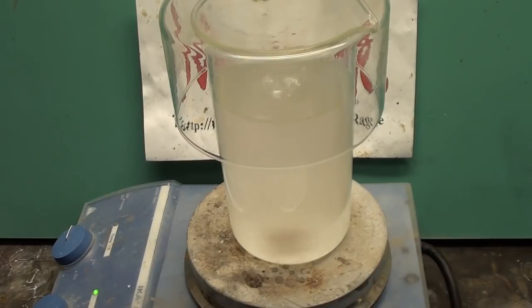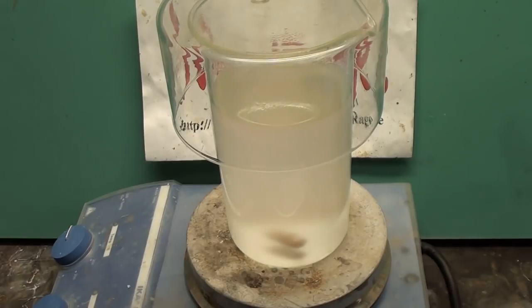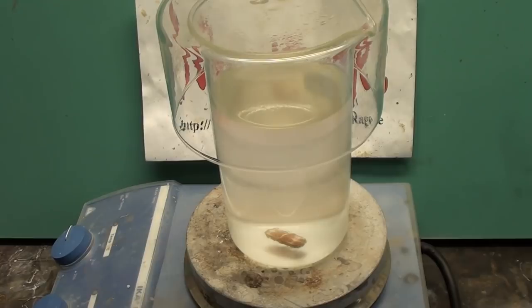The cloudiness is actually really small droplets of methyl ethyl ketazine along with some methyl ethyl ketone. Stop stirring and let the mixture separate into two layers. This is very slow since the droplets are so small, so I've time-lapsed over two hours. Don't start the next step until both layers are completely clear.